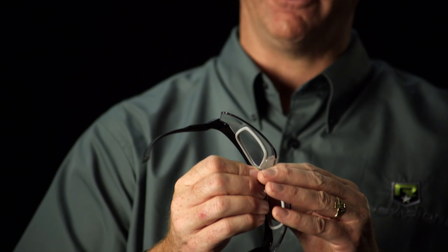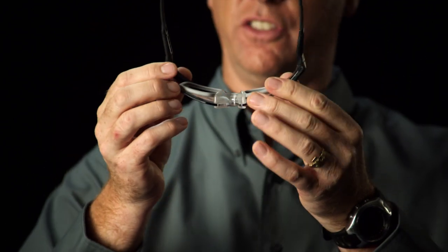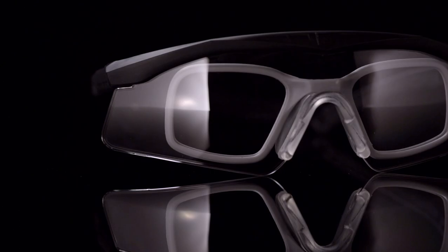With the new carrier that we designed, we designed it to sit in such a way that it doesn't have to conform, and you'll see the way it sits away from the lens. So another benefit of this design is there's no correction factor needed in order to make lenses for this. Your straight up prescription goes right into this carrier.